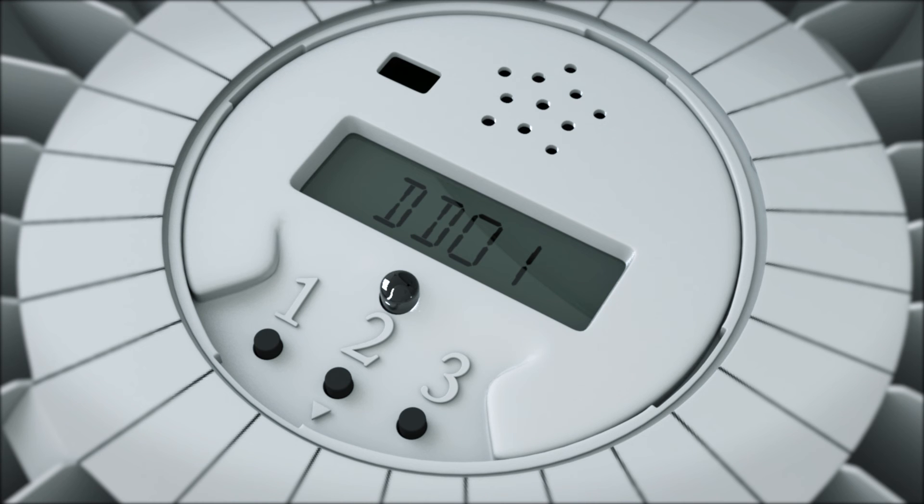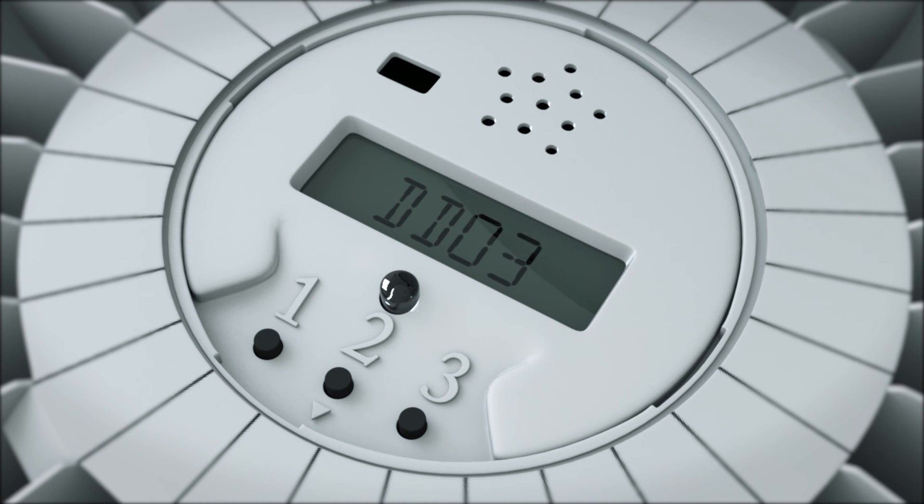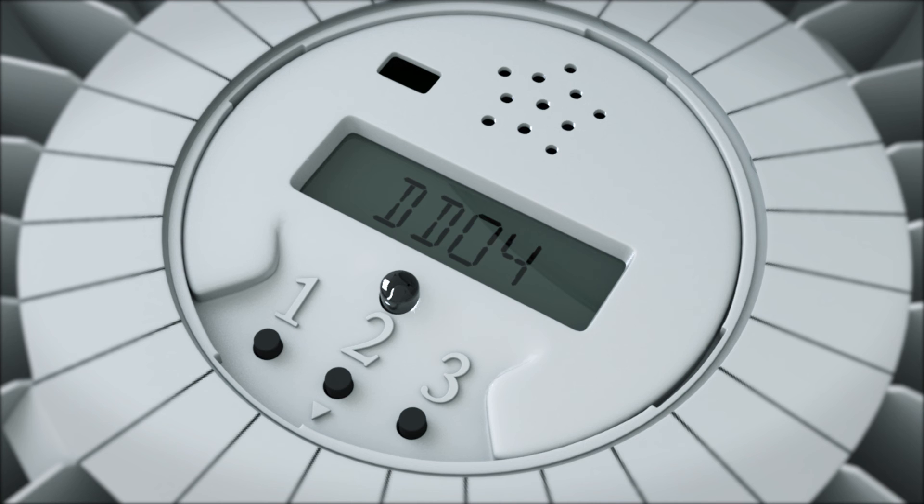Finally, set the day using buttons 2 and 3 and press 1 again when finished.